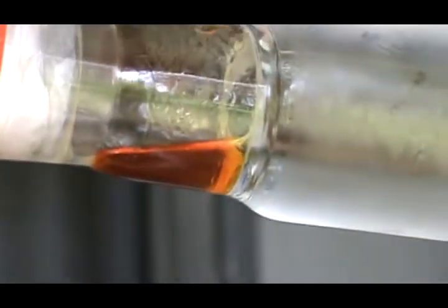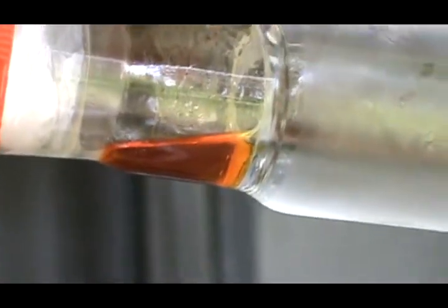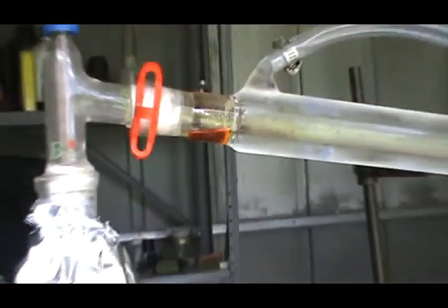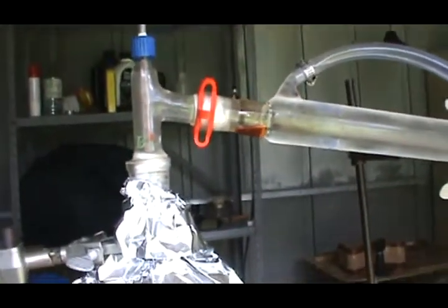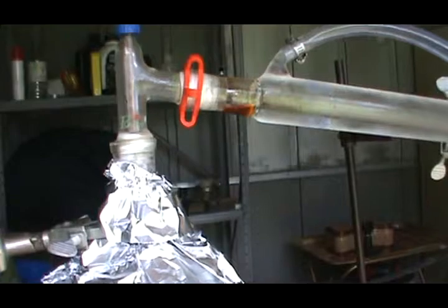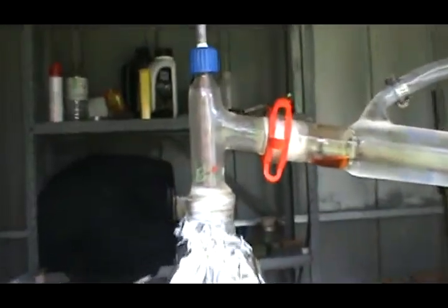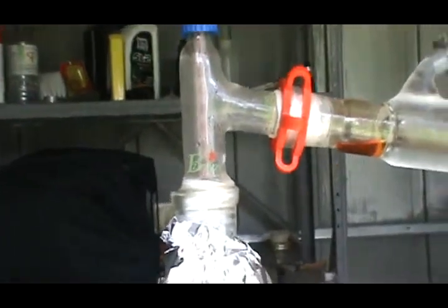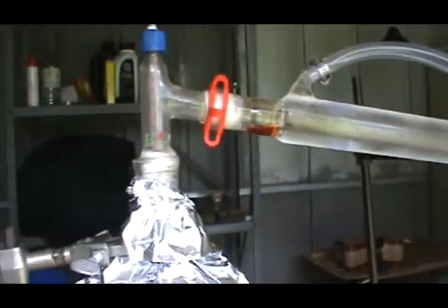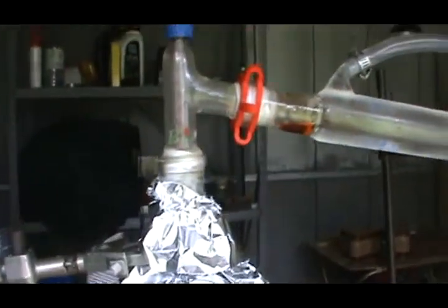You can see the nitric acid there. It's a little discolored because of the kind of sulfuric acid I'm using. It's a drain cleaner called Liquid Fire. I'm from Canada and I only find Liquid Fire in the states so I had to bring it across the border there.